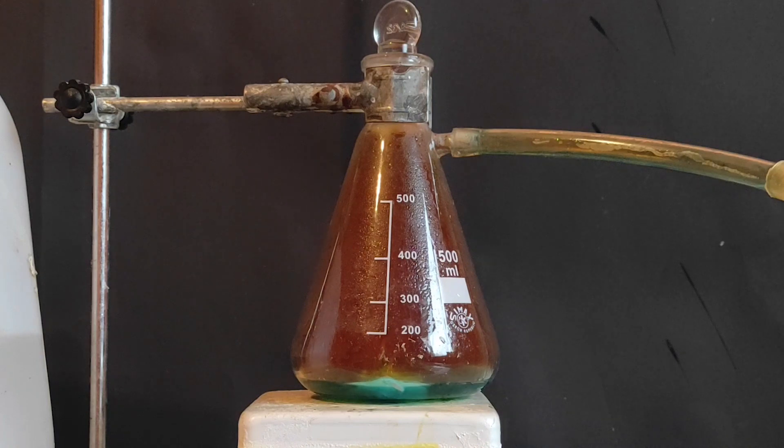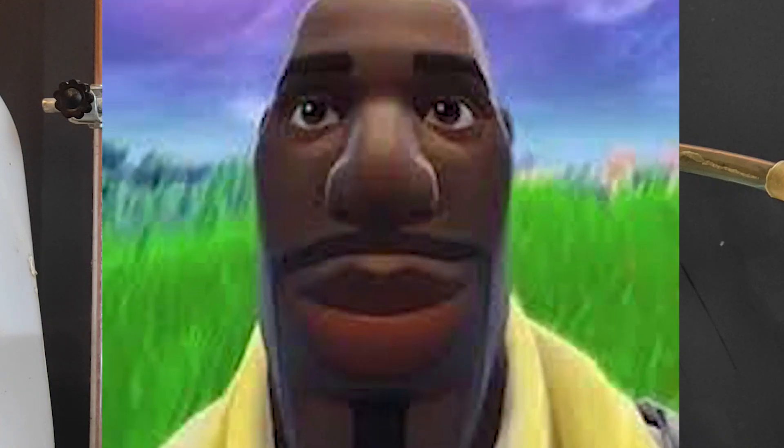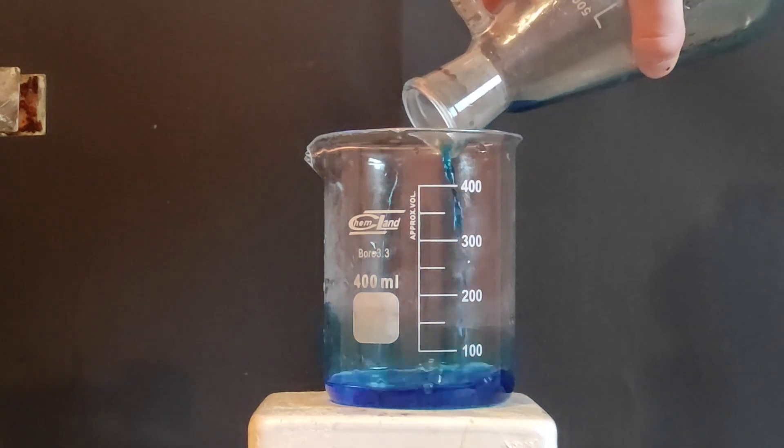This reaction took around 30 minutes, and in that time I went to play some Fortnite. After the reaction has finished I've transferred it into a beaker.